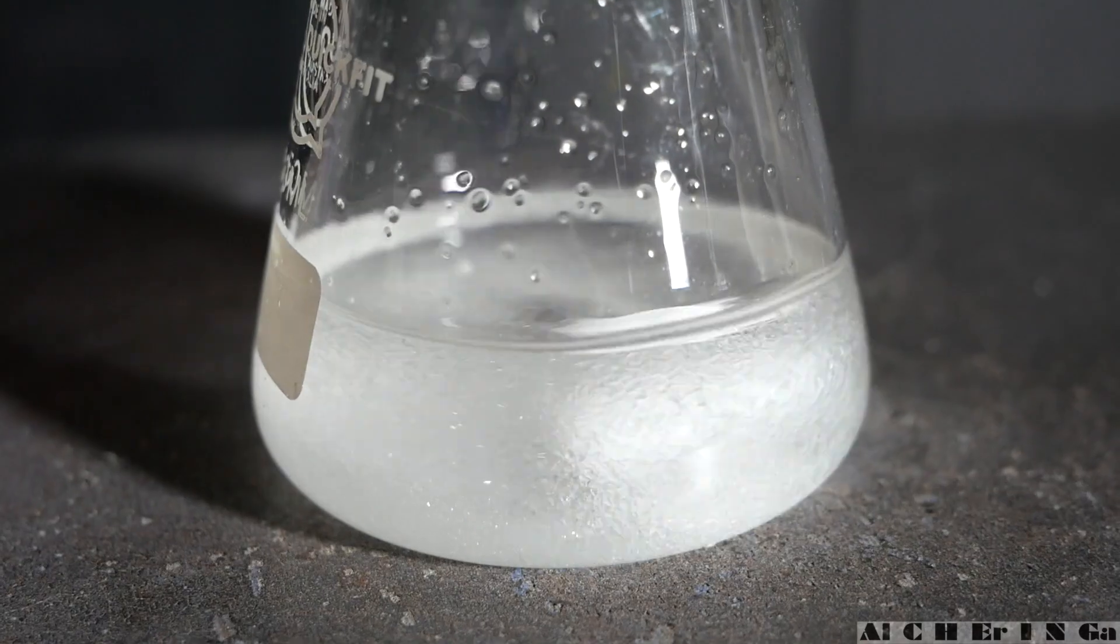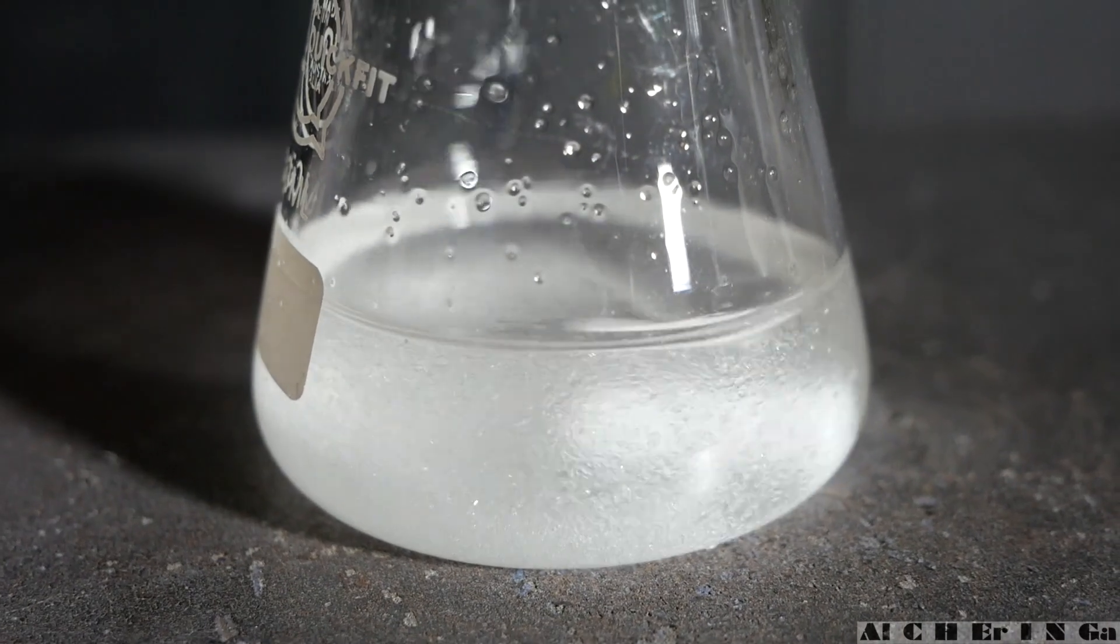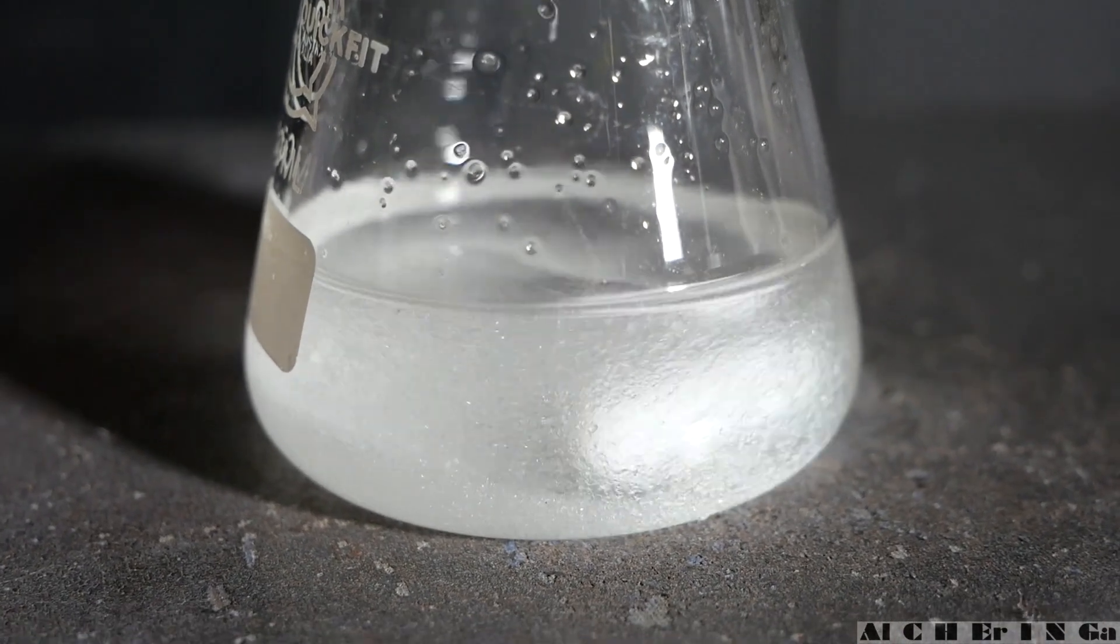As you can see, all of the ammonium acetate crystals will not dissolve in the methanol. This is normal.